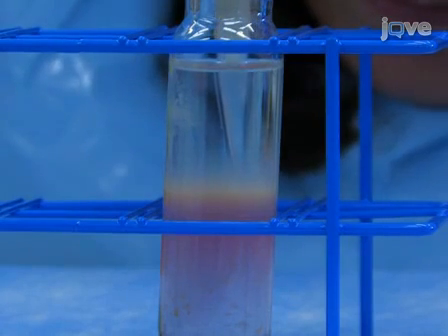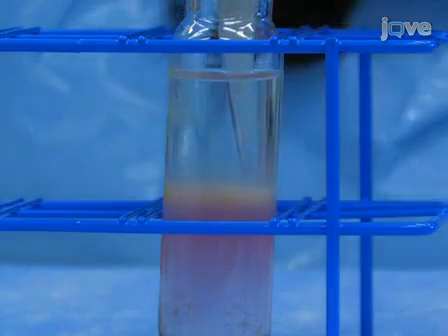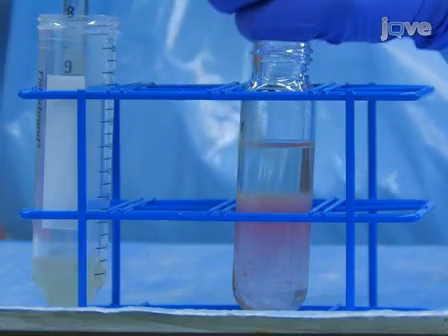Try to minimize the amount of cesium chloride solution that you aspirate while you're collecting the oocysts, because excess cesium chloride might make it difficult to pellet the oocysts during the wash step later on. Transfer the oocysts to a new 50 ml conical centrifuge tube.